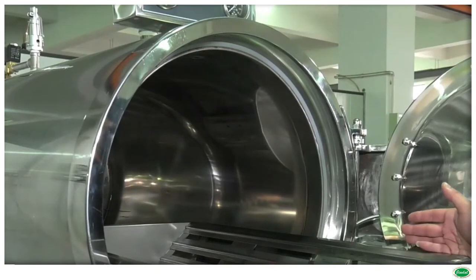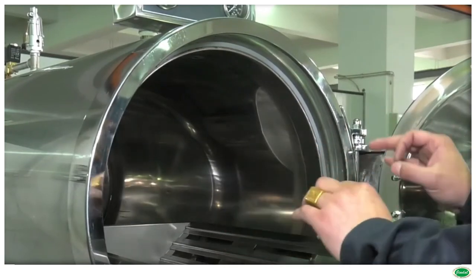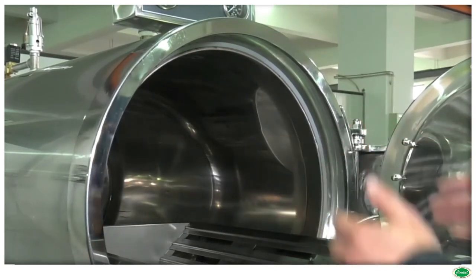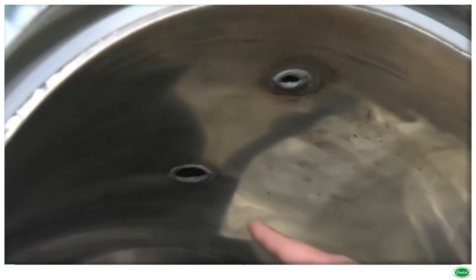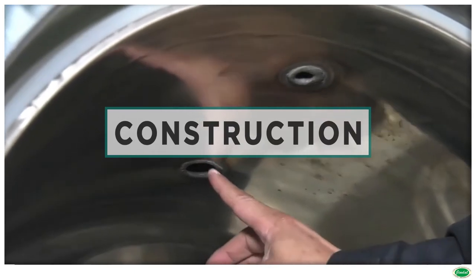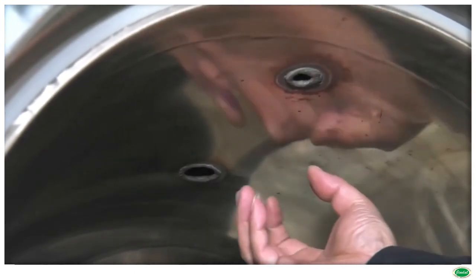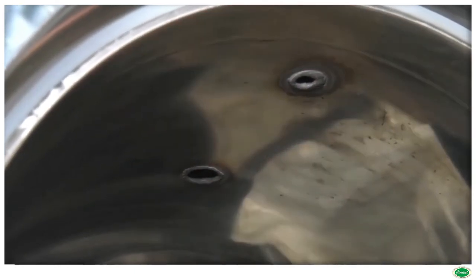Robust and rigid construction designed for all types of bulk sterilization which are commonly needed in medical, agricultural, and pharmaceutical institutions. The high-speed sterilizer is fitted with high wattage heaters. The sterilizer is triple walled with steam jacket and separate boiler.